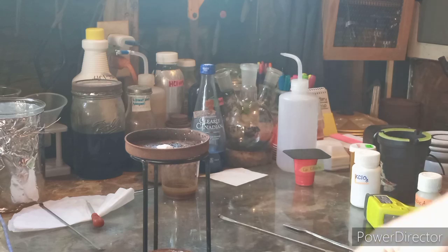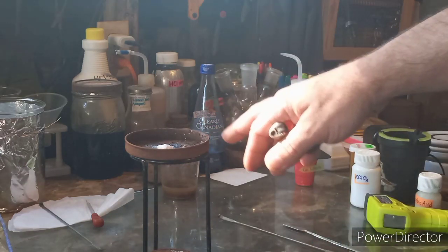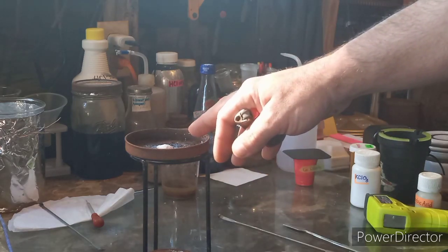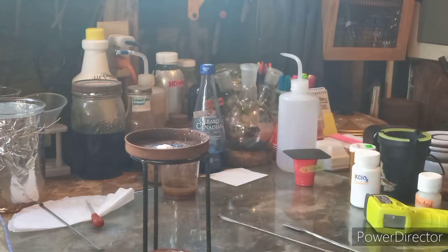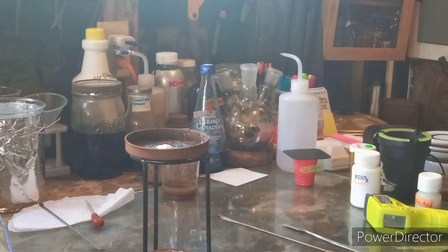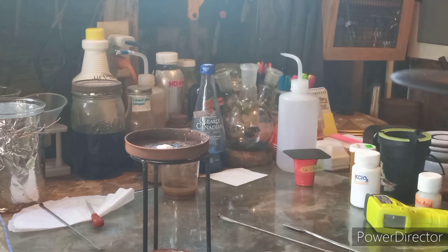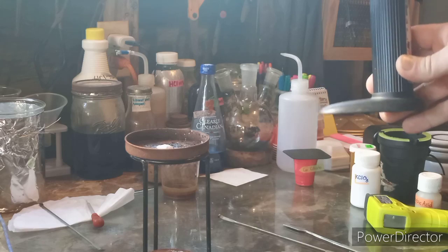Anyhow, to prove that I had made some from the hypochlorite solution that we got — what you see right here is about a one-to-one ratio roughly of ascorbic acid to the potassium chlorate. We're just going to do a little flame test on it here quick. And you'll see right away how reactive this is, proving that I had made the potassium chlorate.